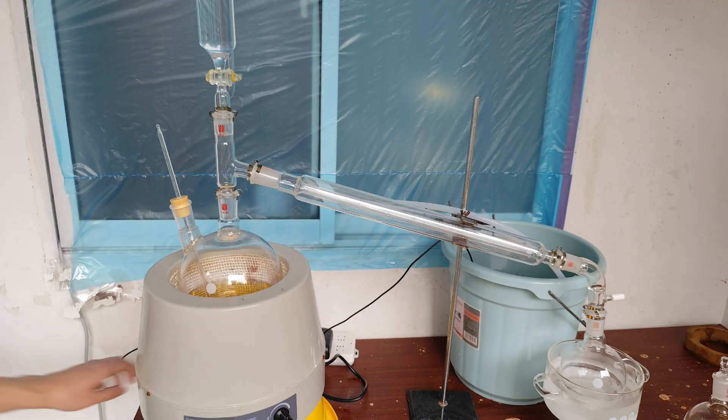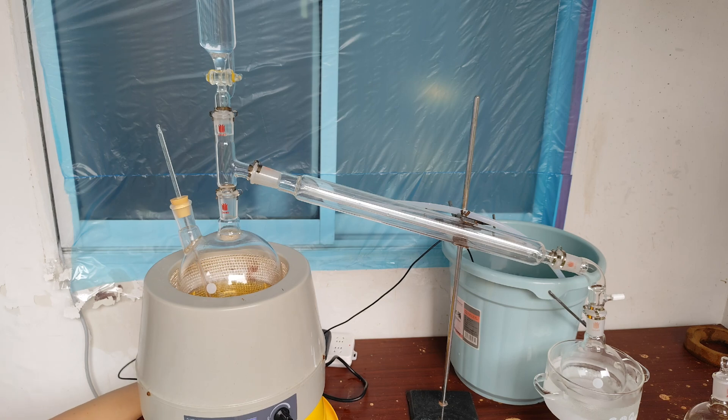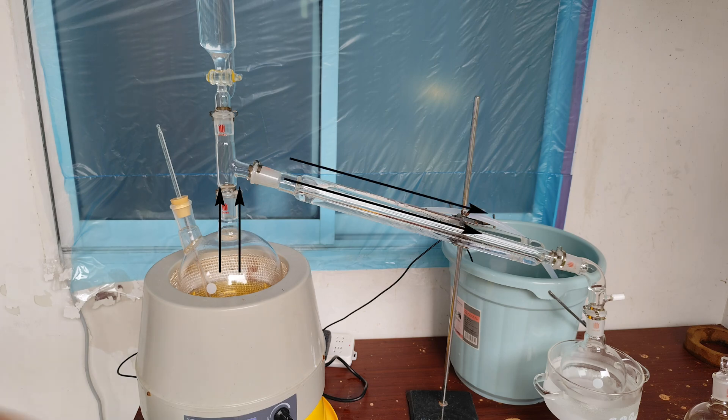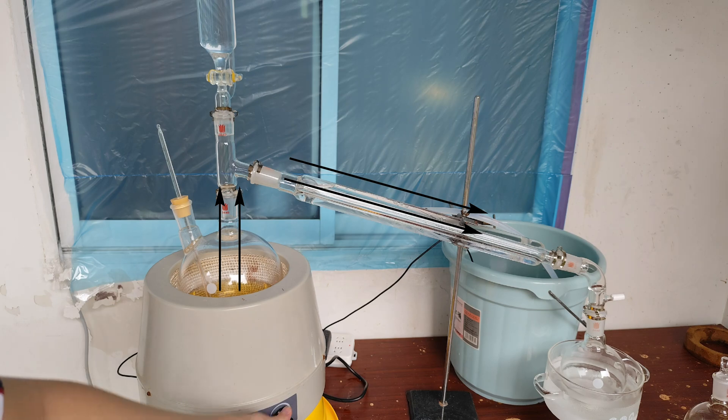I build up this reaction setup, then turn on the water pump and heater. All the diethyl which is formed in the flask would immediately vaporize and cool down back to liquid state in the condenser, then flow into the receiving flask.